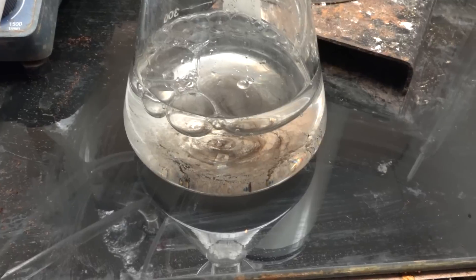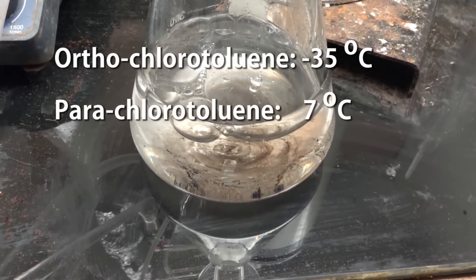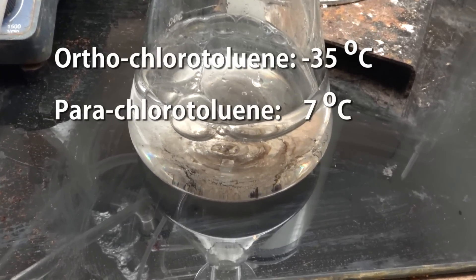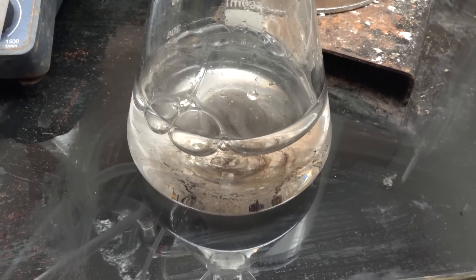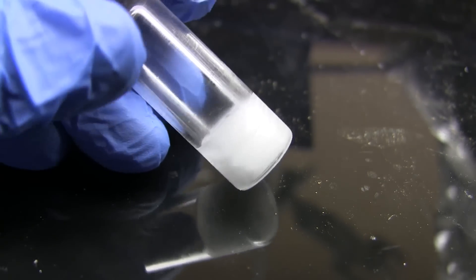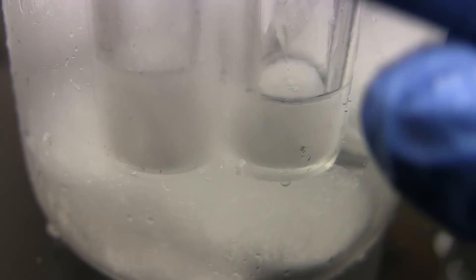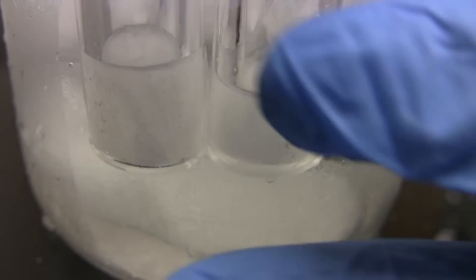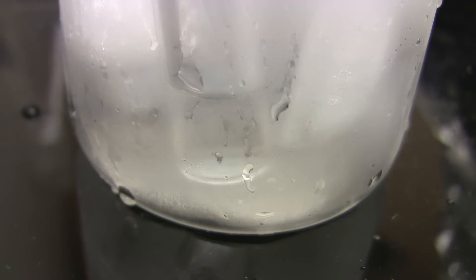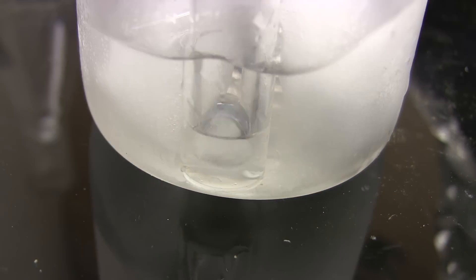Orthochlorotoluene has a much lower freezing point than parachlorotoluene. So we can roughly figure out our purity based on that. This is because parachlorotoluene has a melting point of 7 celsius while orthochlorotoluene has a melting point of minus 35 celsius. Take a small sample of your chlorotoluene mixture and put it in the freezer. If it doesn't freeze at all then it has too much orthochlorotoluene. If it freezes then make a mixture of ice water and place the sample vial in that. If it melts again then it's richer in parachlorotoluene but not quite pure enough. If it stays frozen then it's highly pure parachlorotoluene. Now we didn't simply drop our sample into ice water because chlorotoluenes have a strong tendency to supercool. So starting from a liquid state and lowering the temperature to find the freezing point is terribly inaccurate. It's much more accurate to start from a solid state and warm upward to find the melting point.